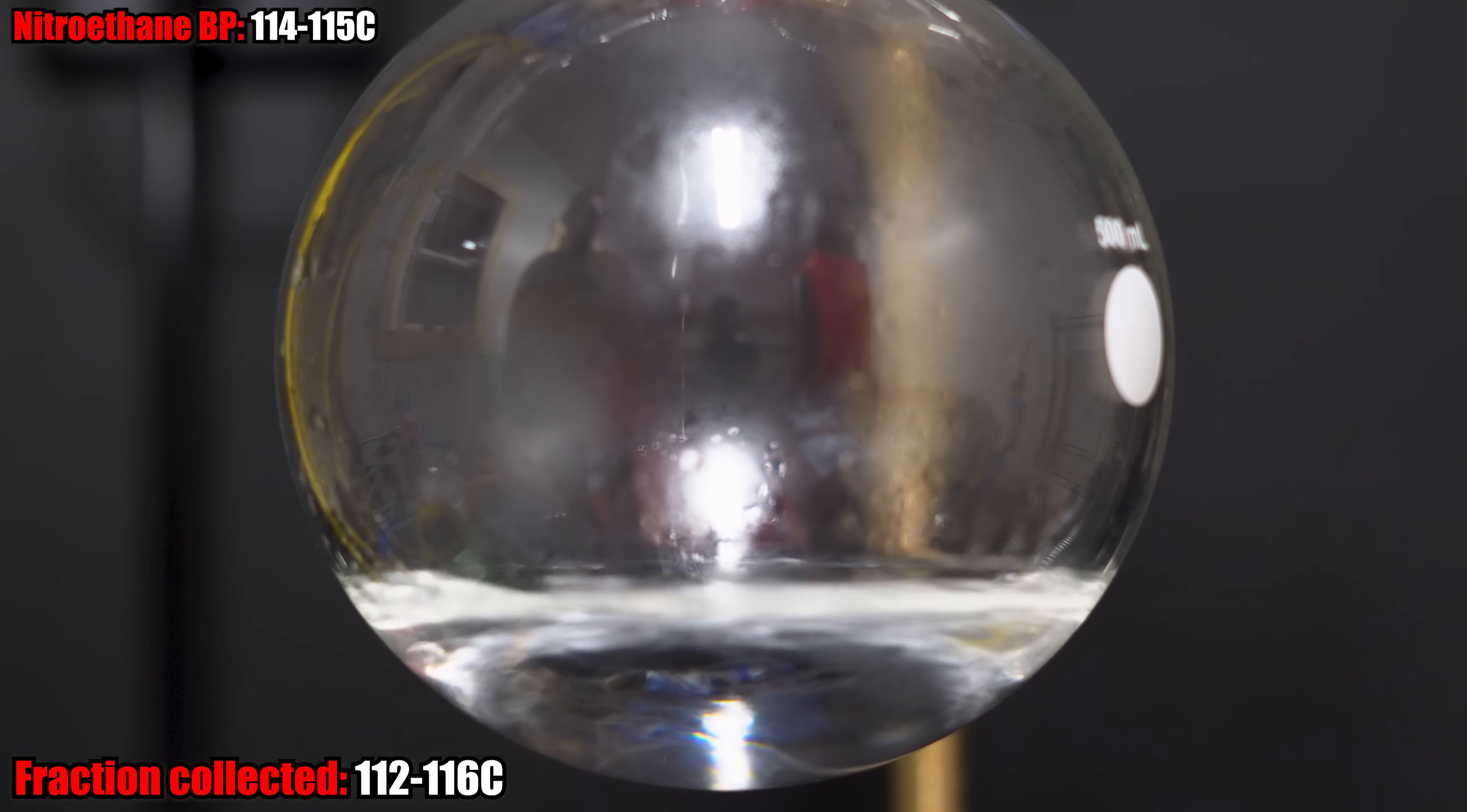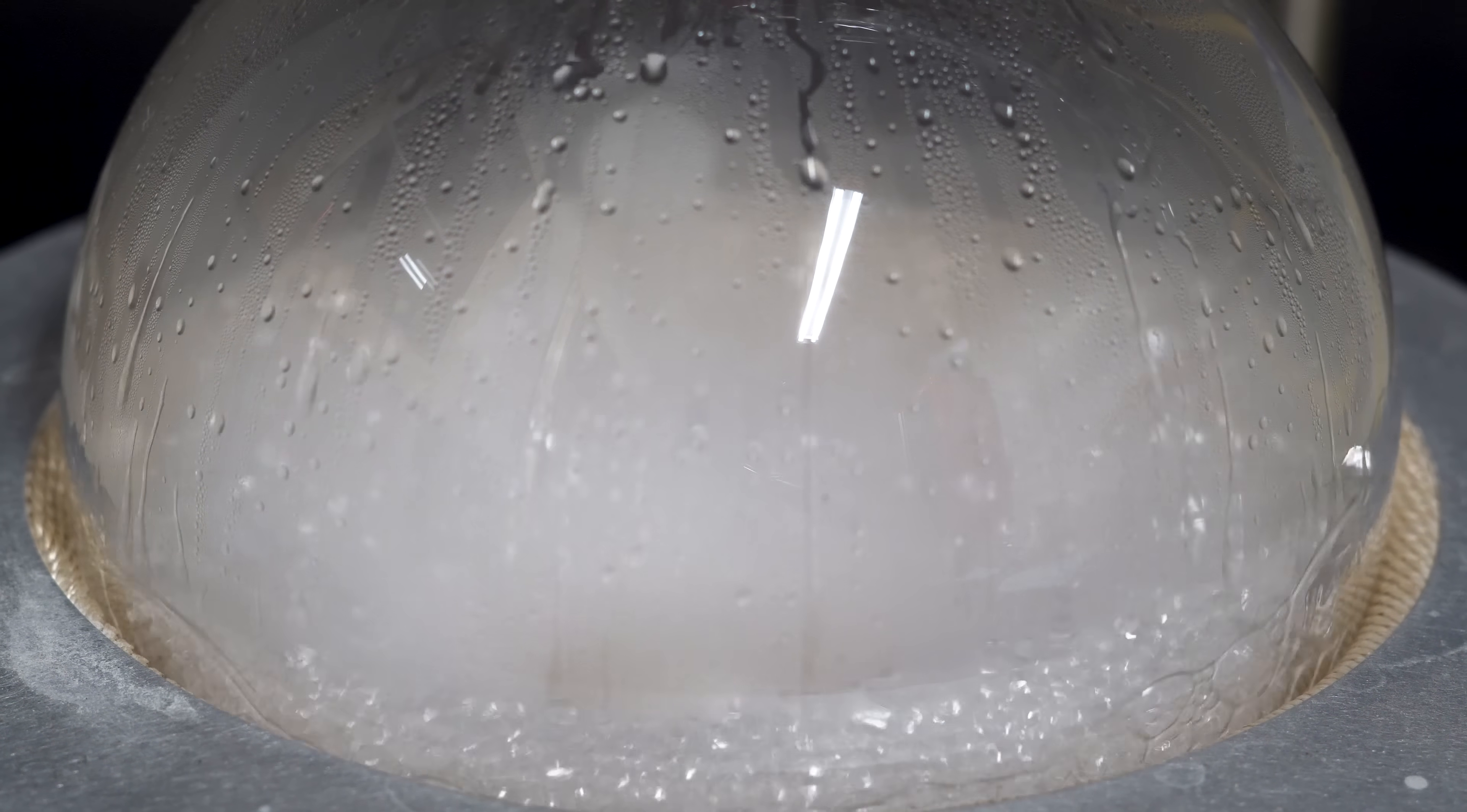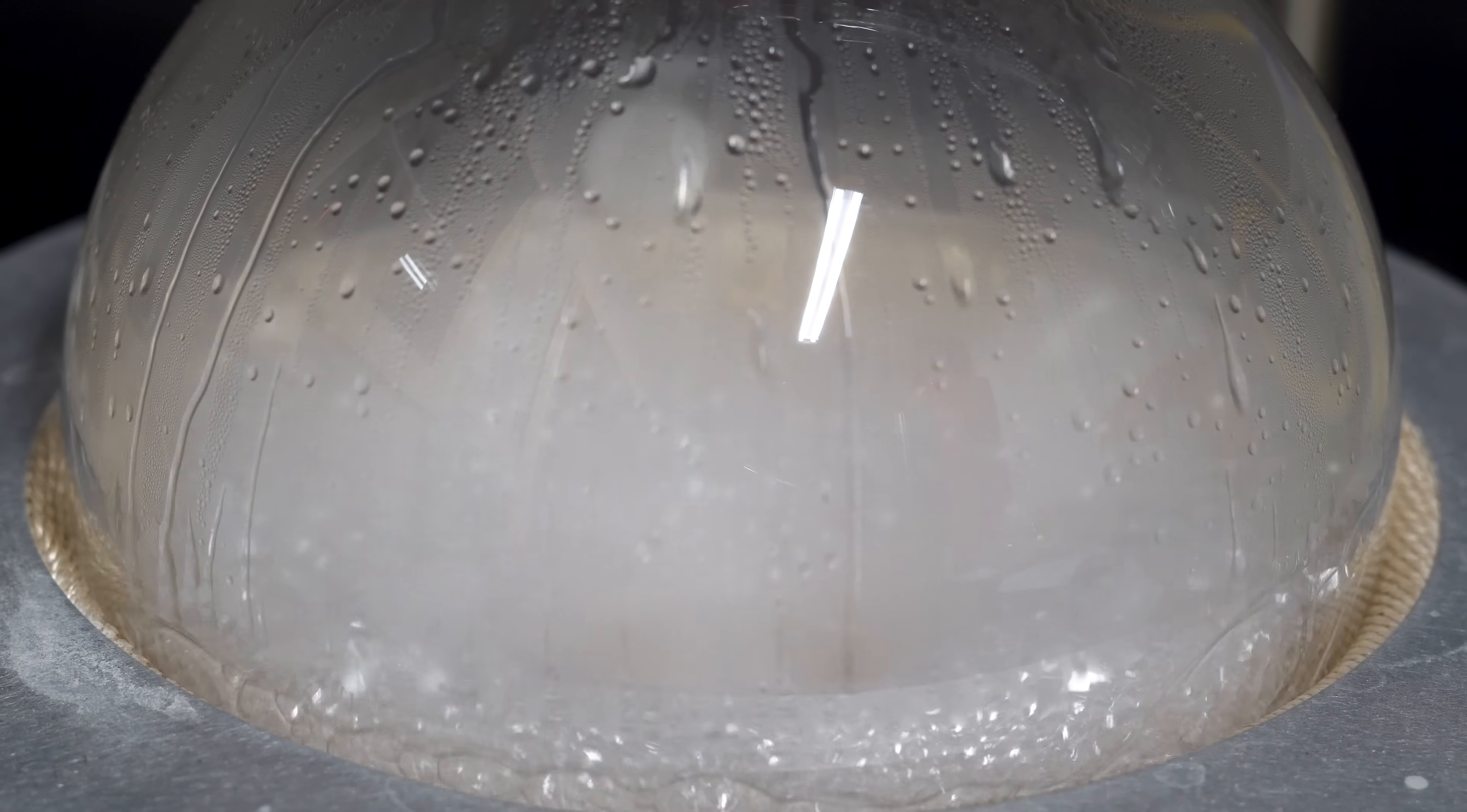Now, like I said before, it is only 1-5% of the butan-1-ol, but it still matters. Frothing did start to increase as the distillation was coming to an end. However, it didn't present any issues, and it stayed in the flask.